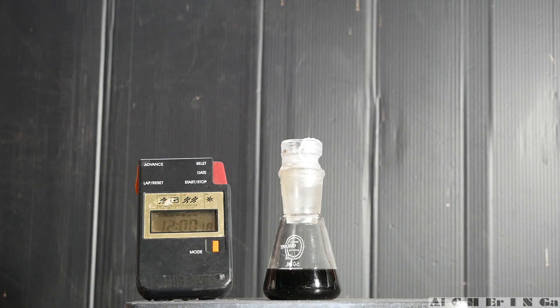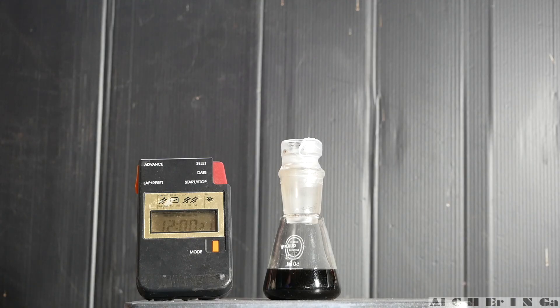After 36 hours, the mixture still looks the same. Stop the timing and stirring.